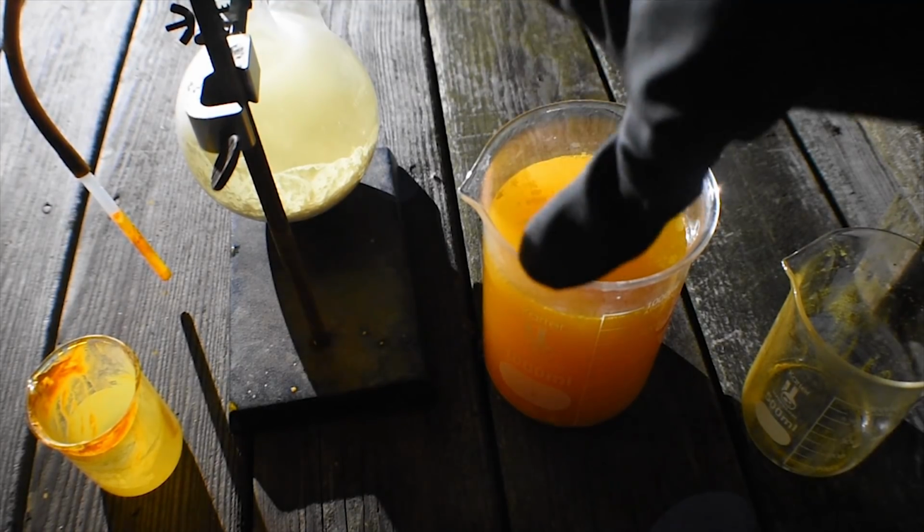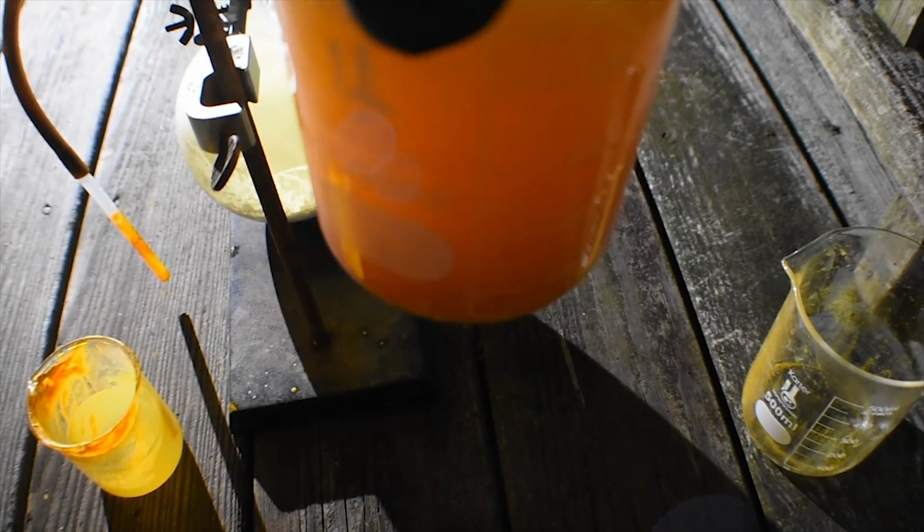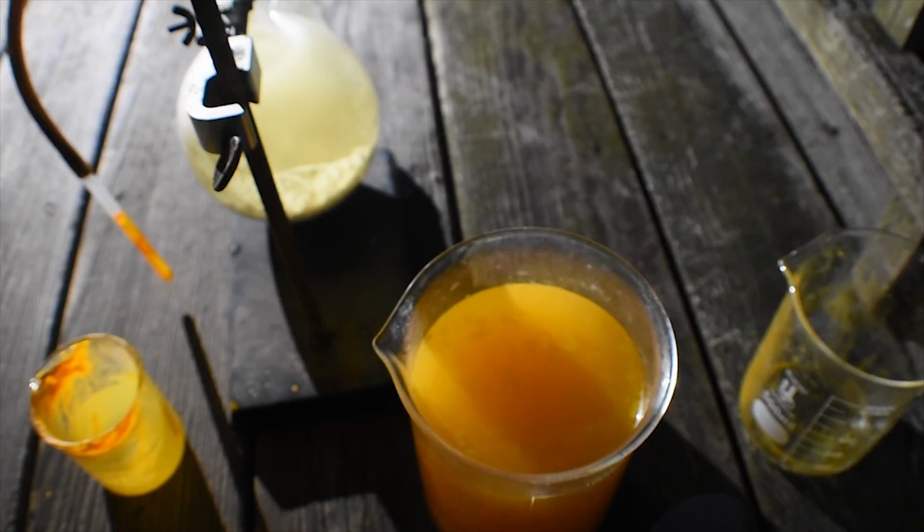We've got a fair amount of nice precipitated perthiocyanogen, if this thing would focus. You probably can't see it, but it's down there. And we're just going to filter this, and I'm going to stop the flow of chlorine, just add some more water to it, and just let that settle down on its own out here, and then we can observe the perthiocyanogen. So yeah, let's go back inside.